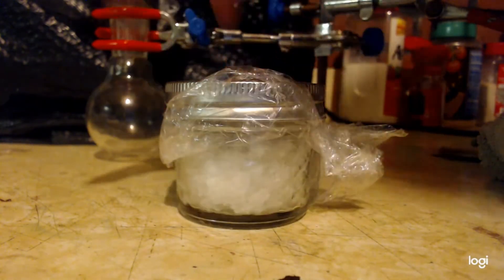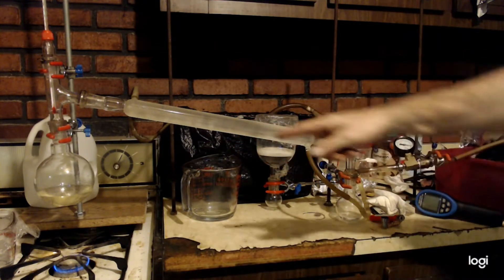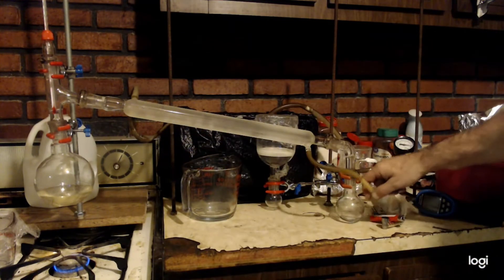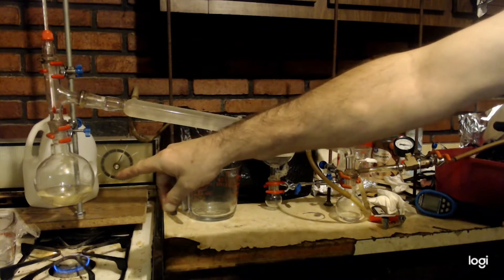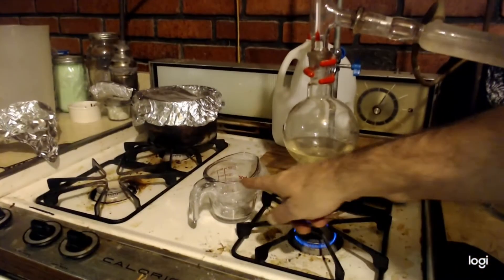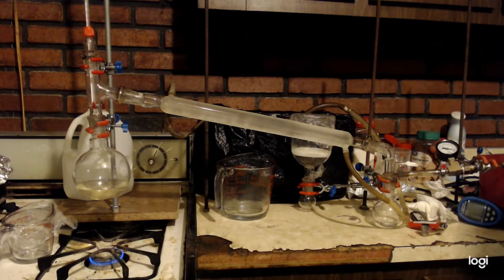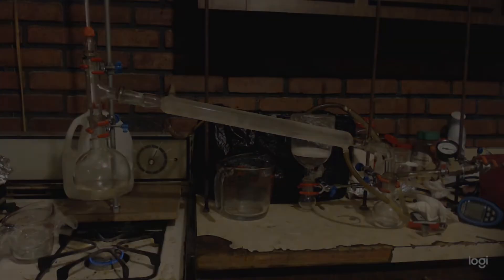Let's go for another batch. I'll put that ethanol in the freezer. I got it set up for distillation - you can see my stuff over there starting to get yellow. When I start seeing a bunch of precipitate, I'll pour it back into that cup and we'll get another batch. Hopefully at least as good as the last batch - then that would be 80 grams, and even if half is water, that's a 40 gram yield, which I'd consider really good.